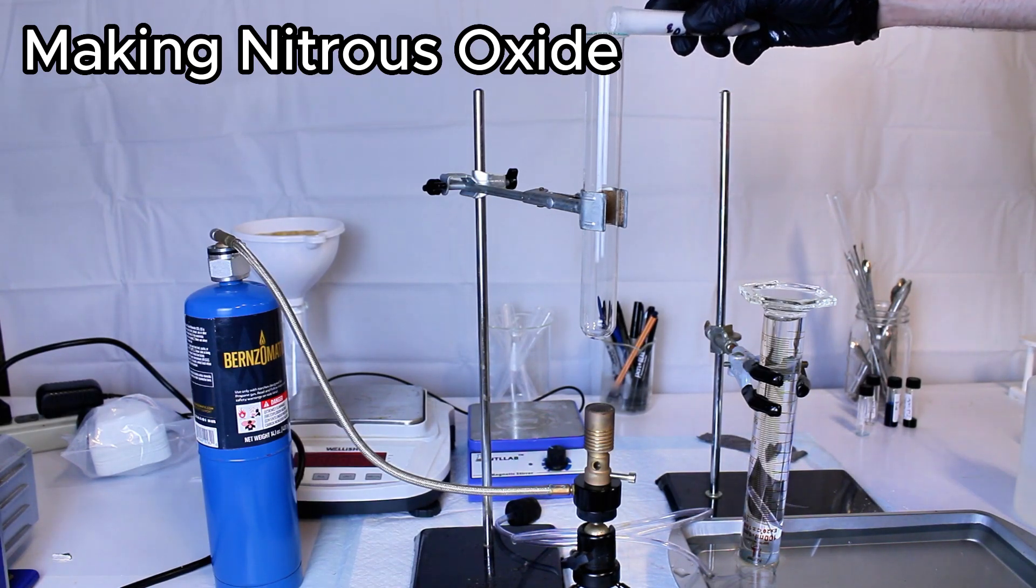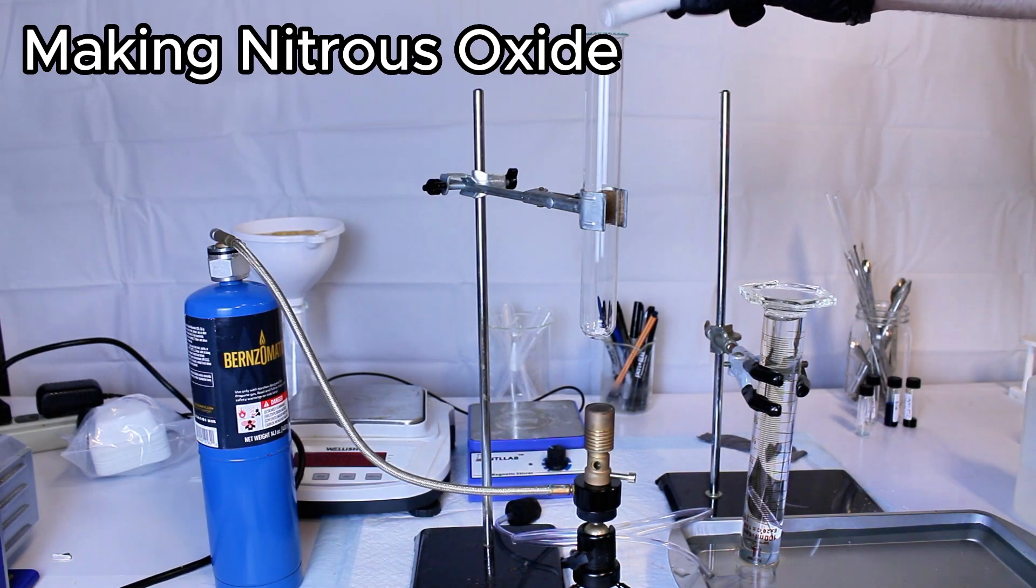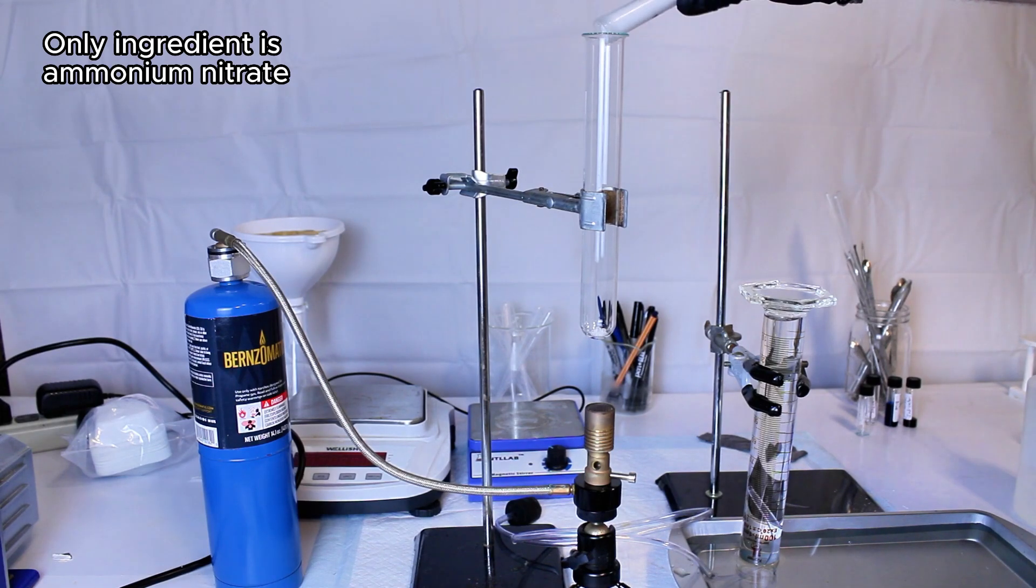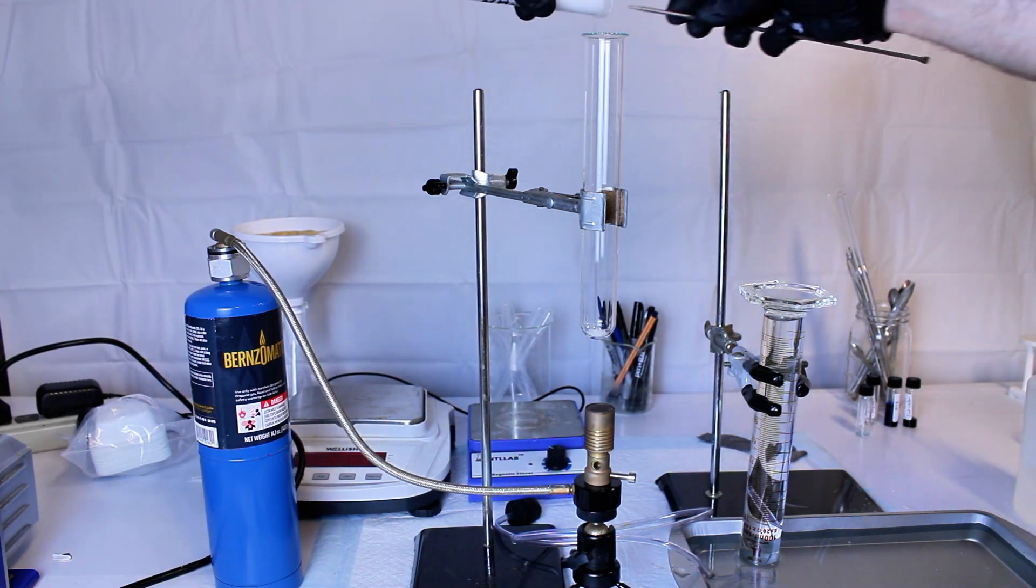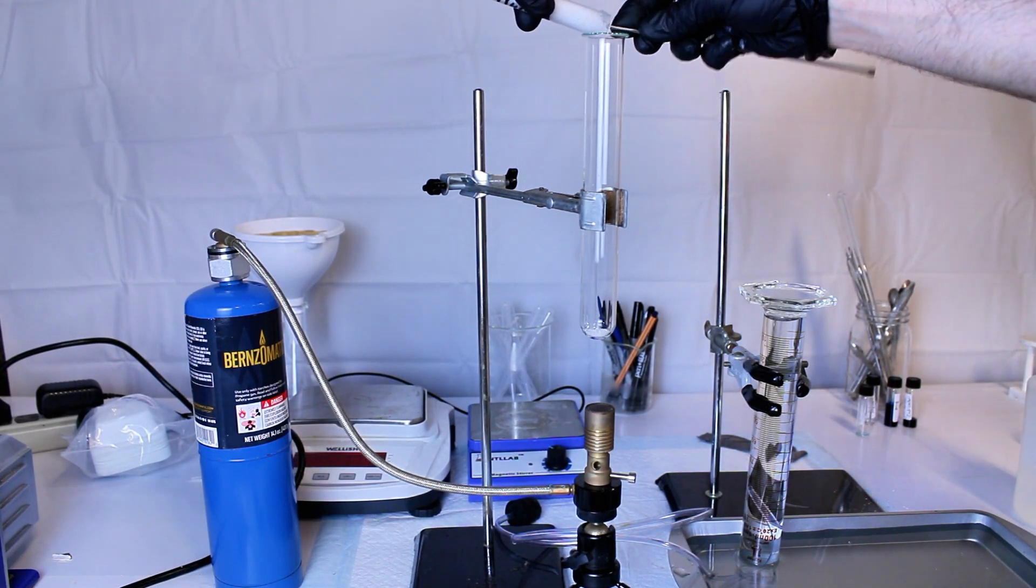Today I thought it would be fun to make nitrous oxide because it's actually pretty easy to do. The only ingredient you need is ammonium nitrate, which I actually made recently, but I haven't finished putting the video together on it yet, so keep an eye out for that.